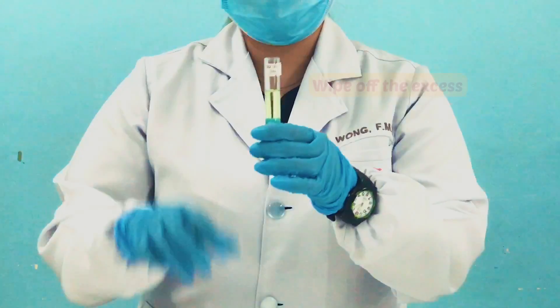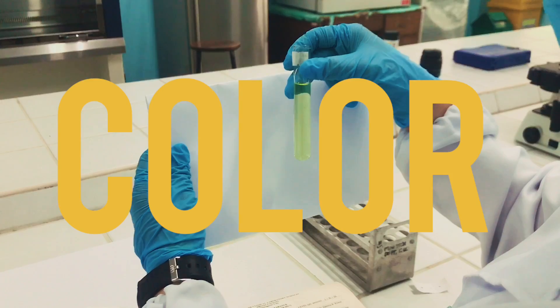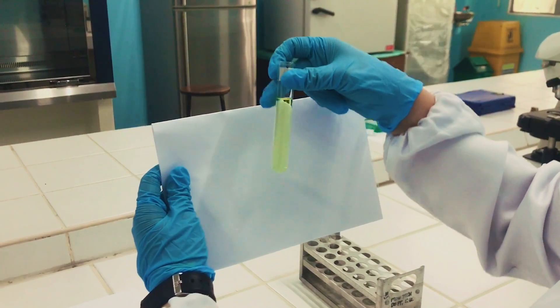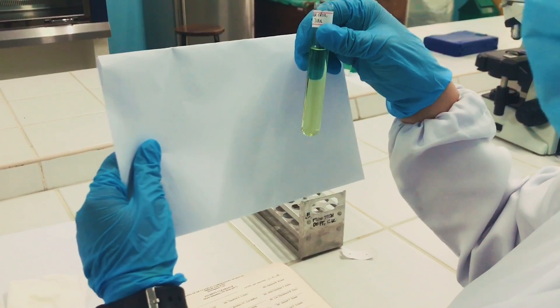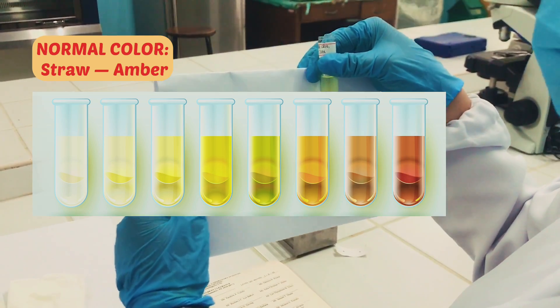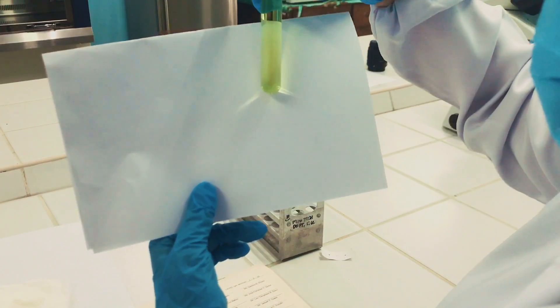Gently wipe off the excess. Now we have to determine the color of the urine. Put your tube against a white background and then determine its color. Normal color of urine ranges from straw to amber. Any color outside of that range is considered abnormal. Let's determine this color.